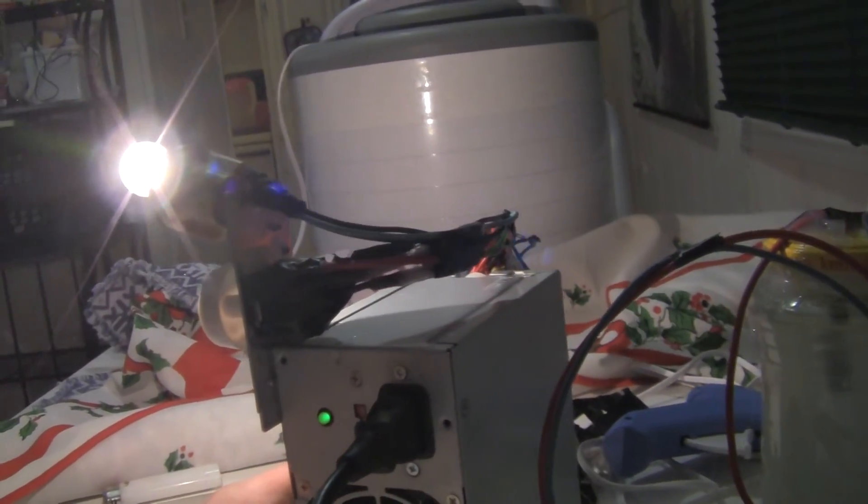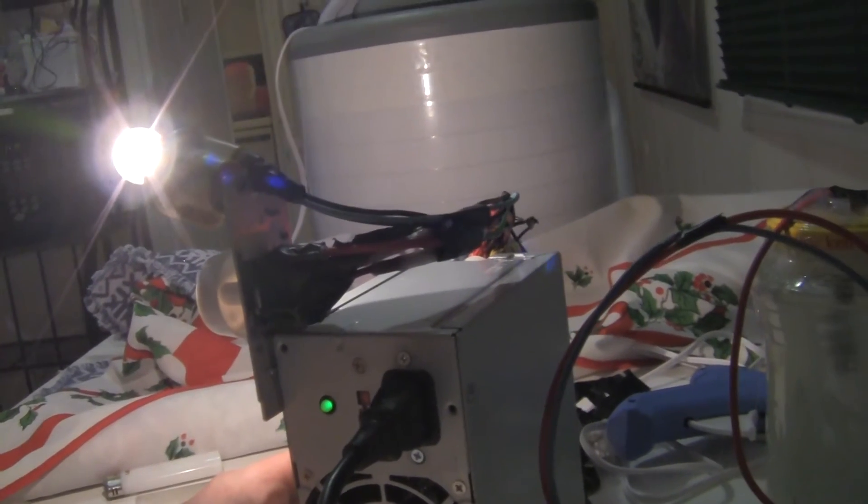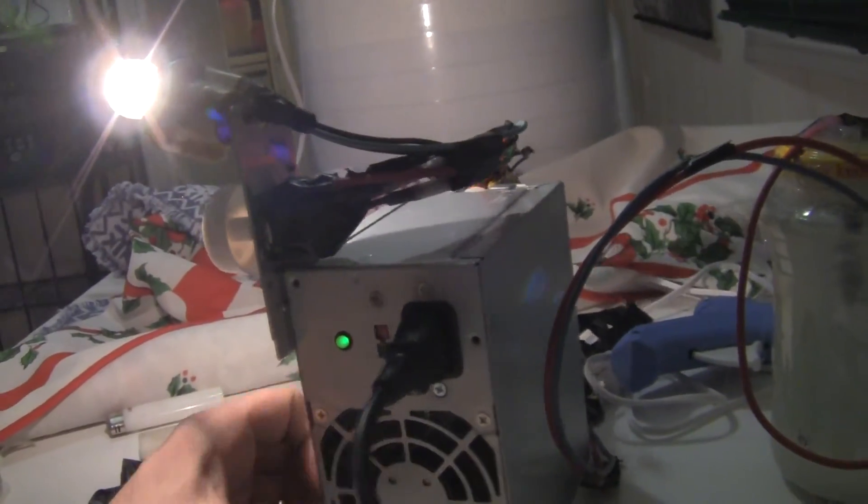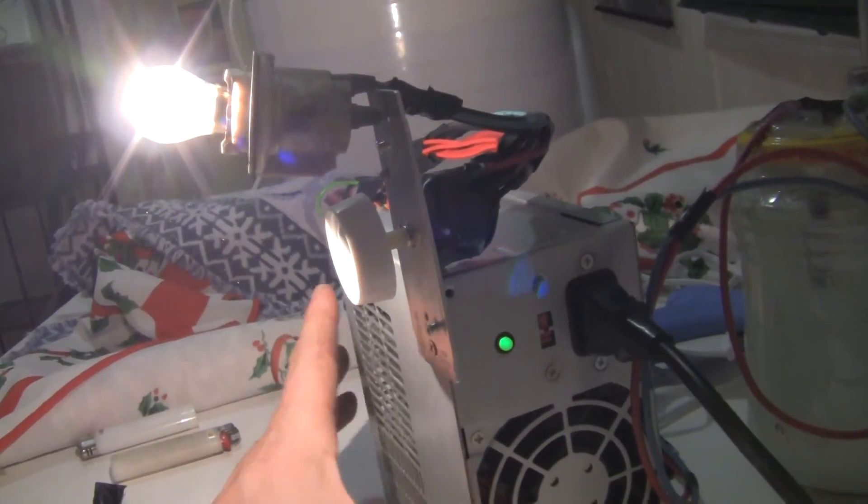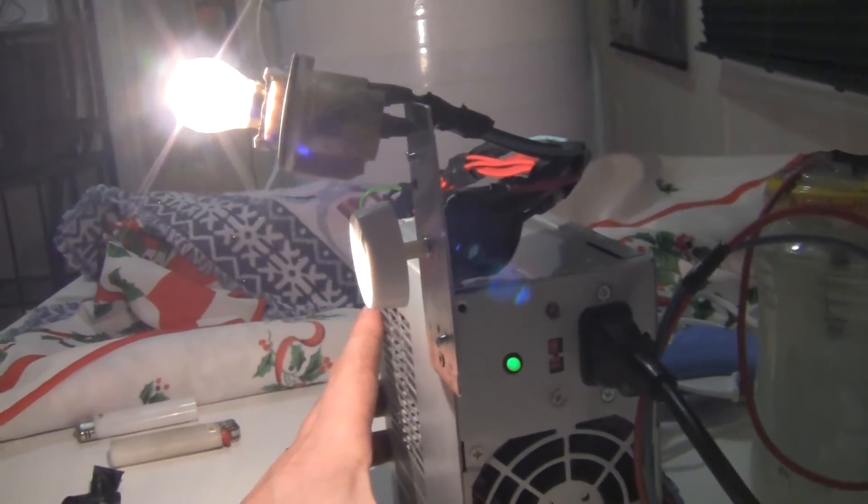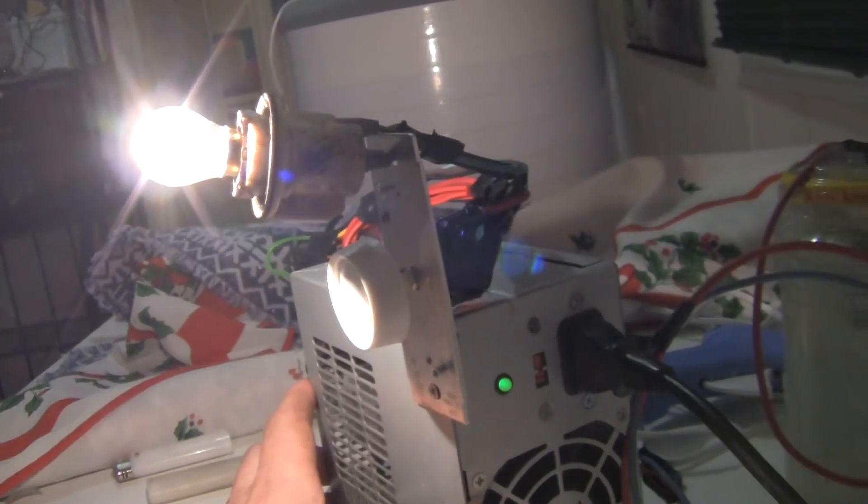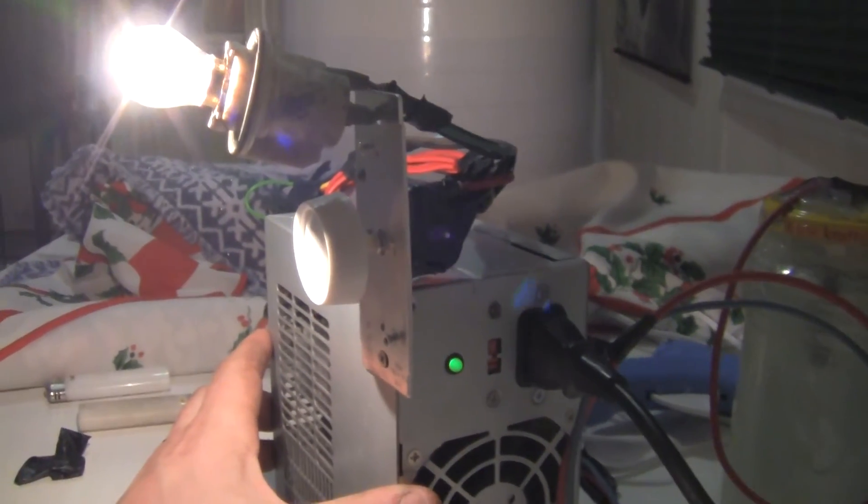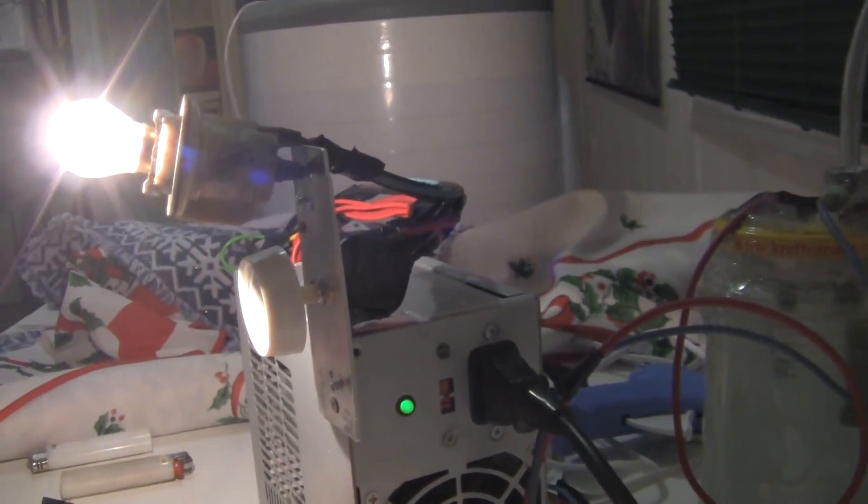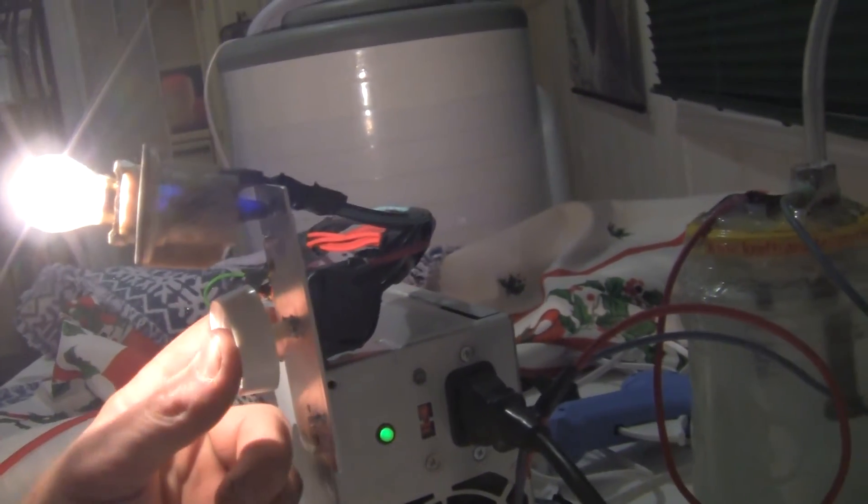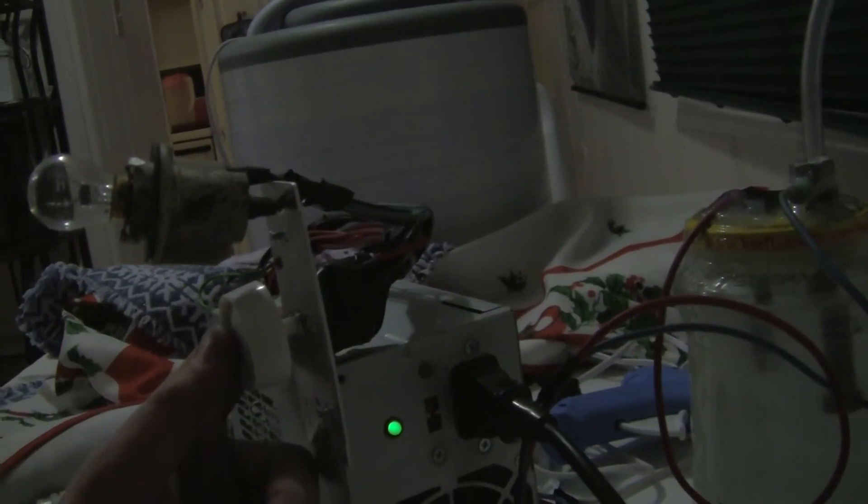So that was pretty interesting. I hadn't seen that around anywhere. It was a five, six, twelve dollar light switch dimmer and I thought it was cool, so I can just shut the cell off and turn this all back on.